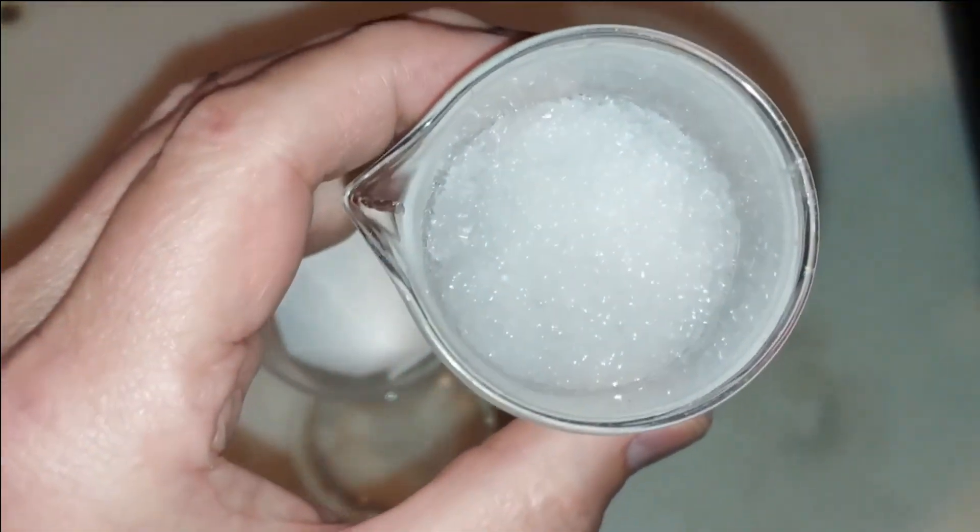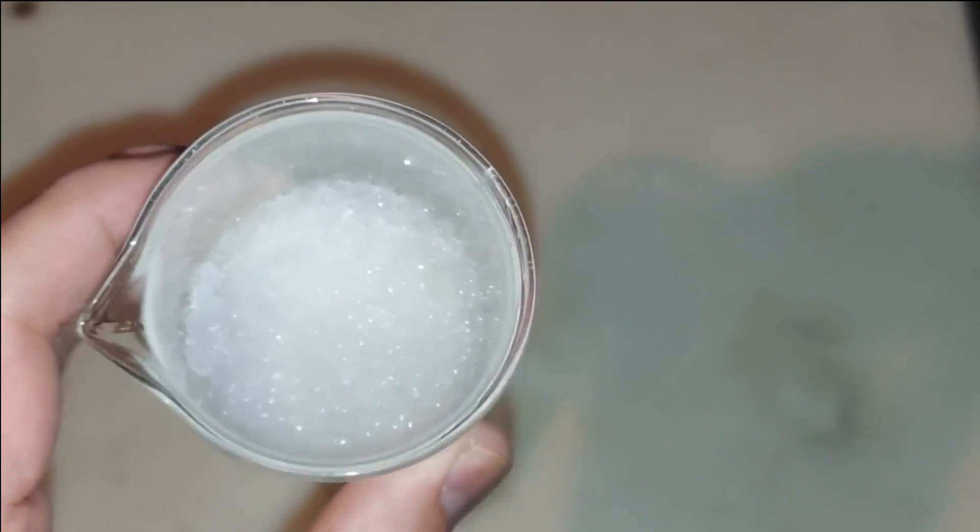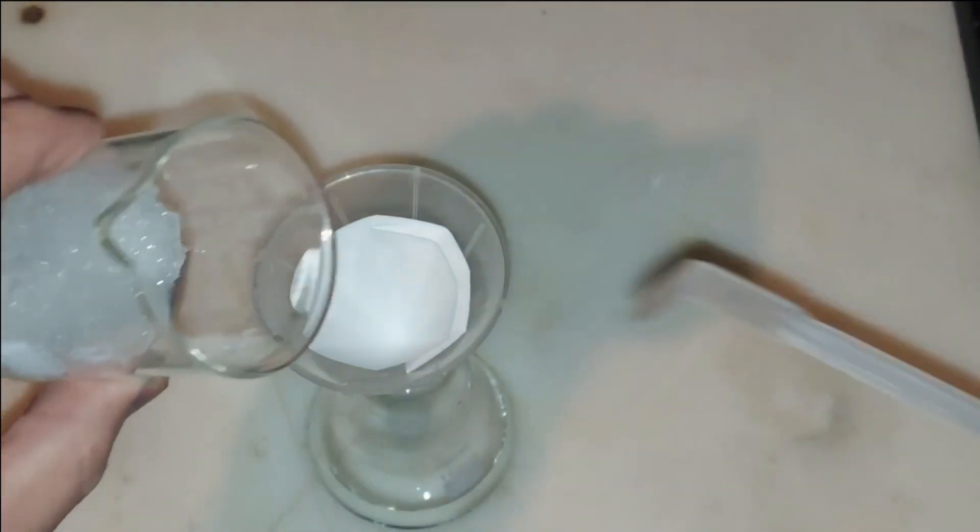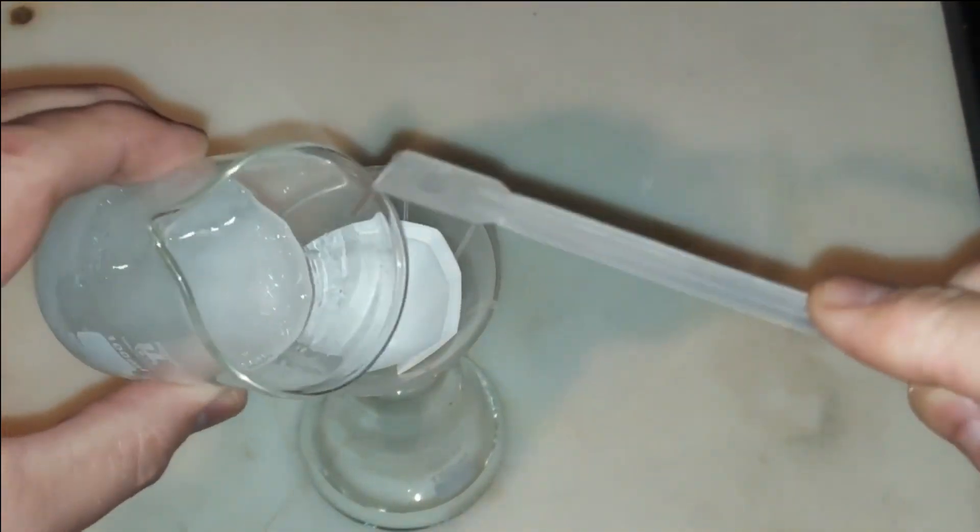Okay. You can see our crystals there. Nice looking crystals. They always are when they come out right.